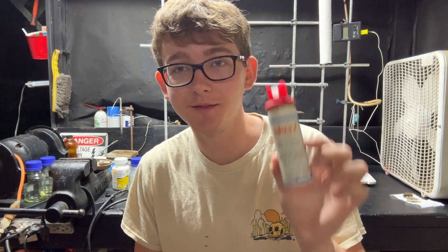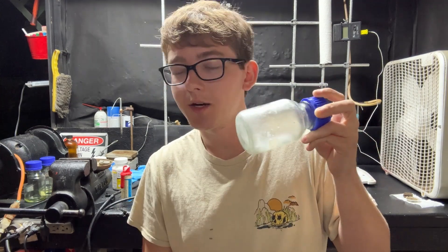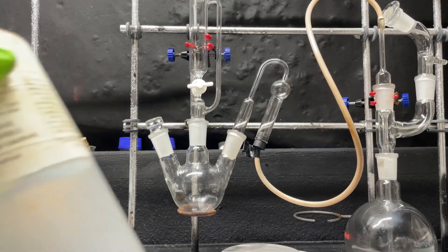So here I've recreated that original mace using alcohol ethanol and one percent chloroacetophenone. This right here is original recipe mace and it will sting. So let's get into the video, make some of this and test it on ourselves. It's a terrible idea but I'm going to do it because I hate myself.